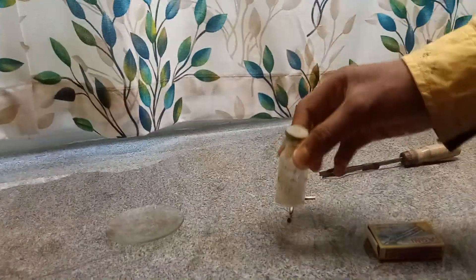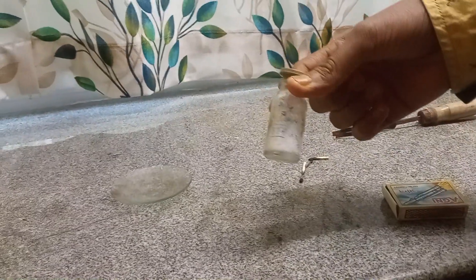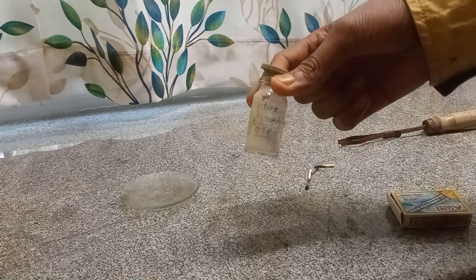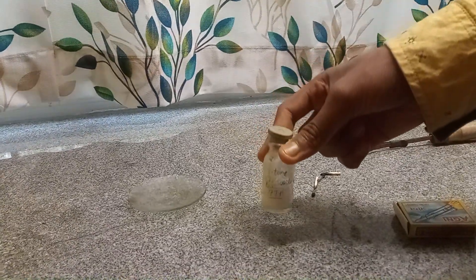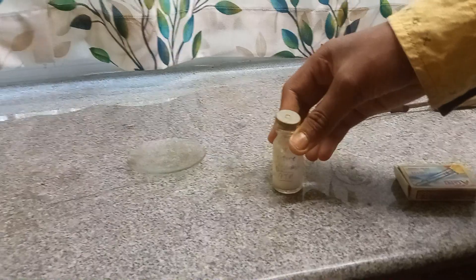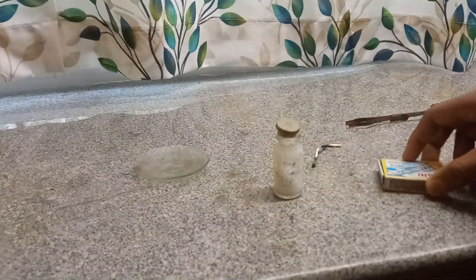This is also a dry explosive. It means that if you dry it, we can just detonate it with a hammer. Let me show its explosion.